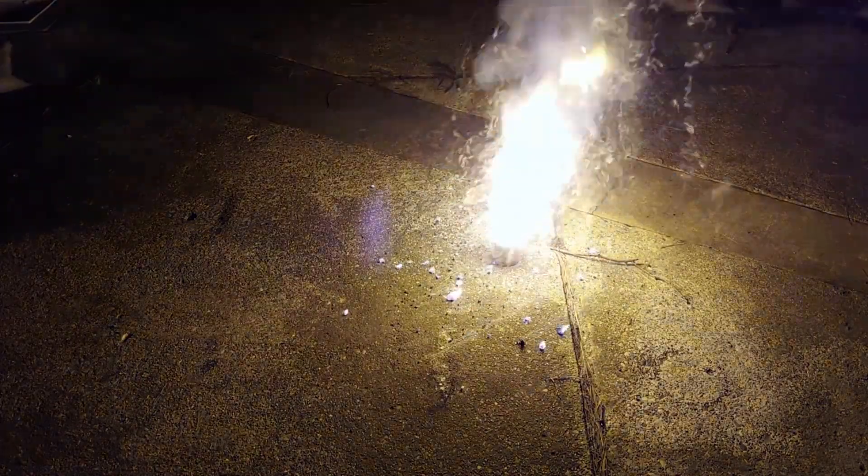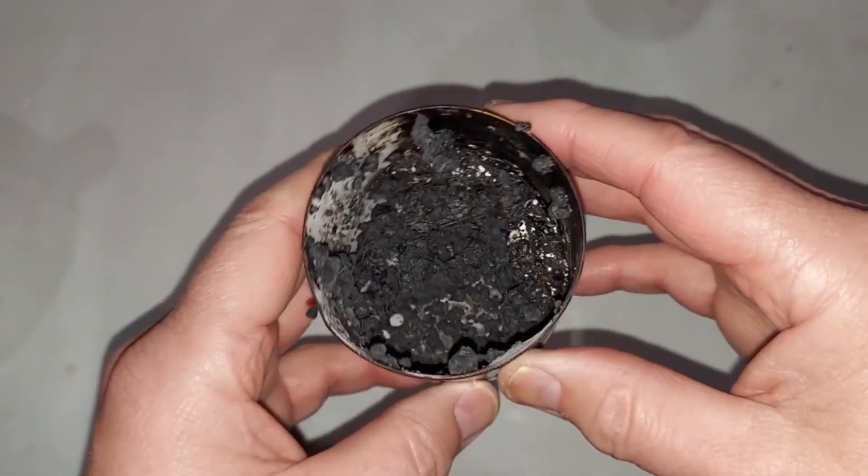All right, adding a couple drops of sulfuric acid here. Like I said, stand back. You can see all of the carbon that was produced by the burning sugar in there.